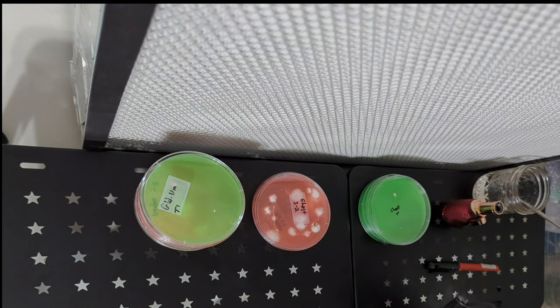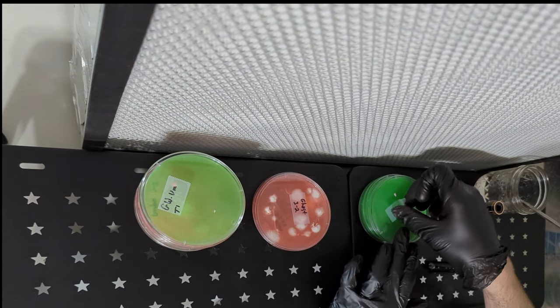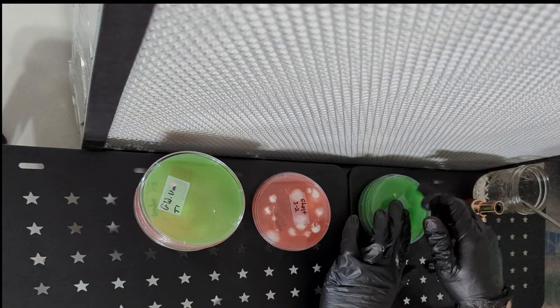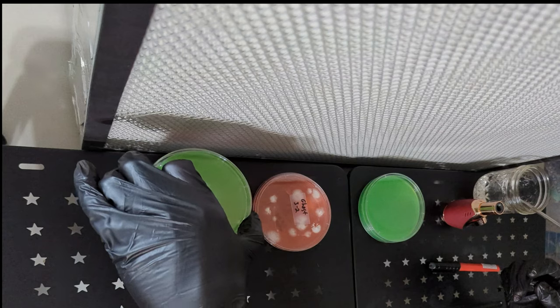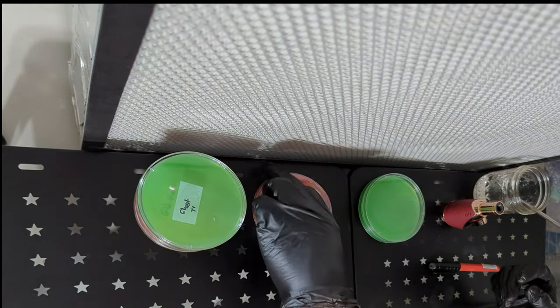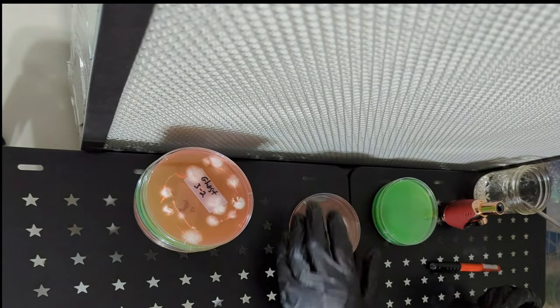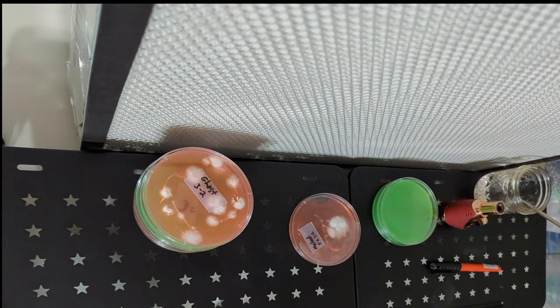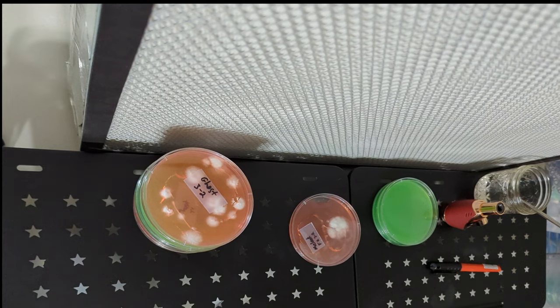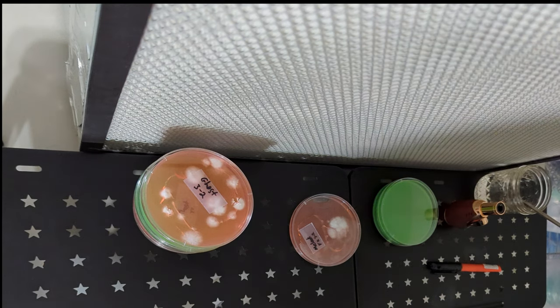Once you have done your work you want to close the plate immediately. It's best to not completely remove the lid but rather just raise it slightly. Just enough to get your scalpel or whatever tool in there and get out quickly. Make sure not to bump into anything with your tools and try not to set them down after they are sterile. Try not to rub the tool against the plate. Try not to touch anything except what you're subculturing, and this will help reduce the contamination rate.